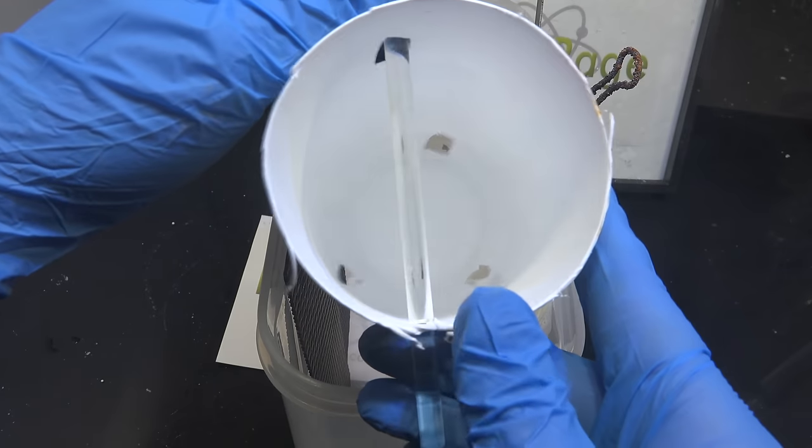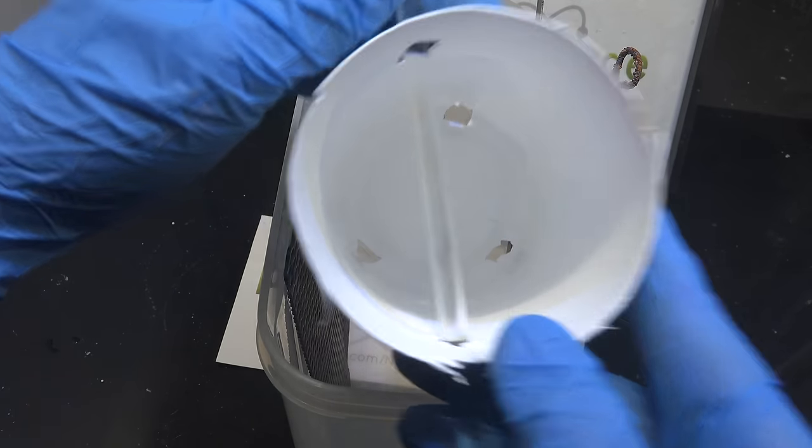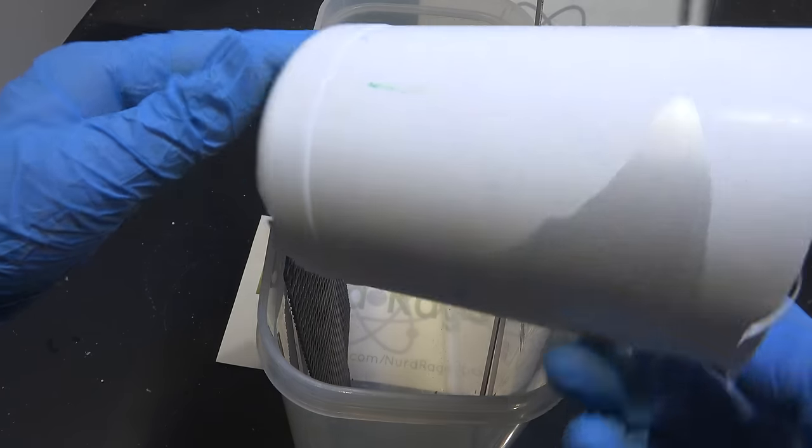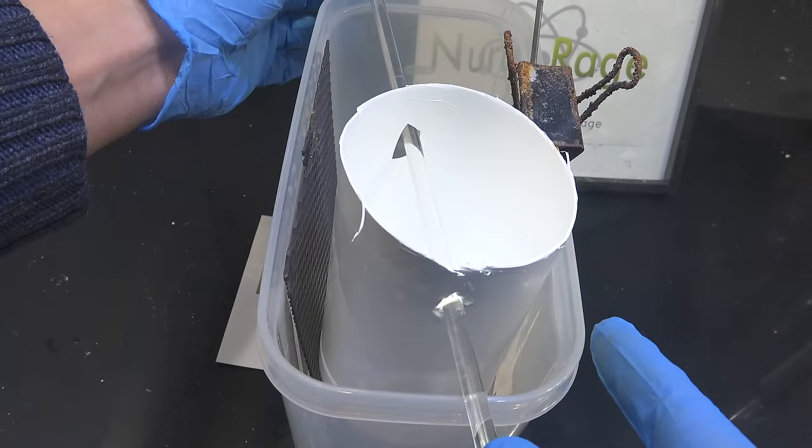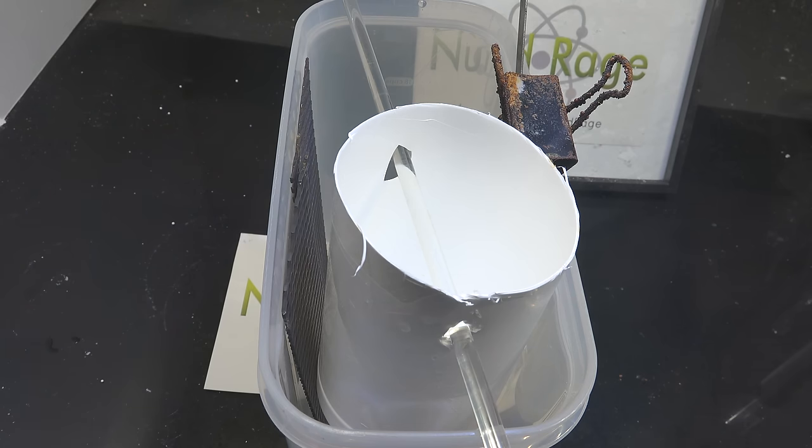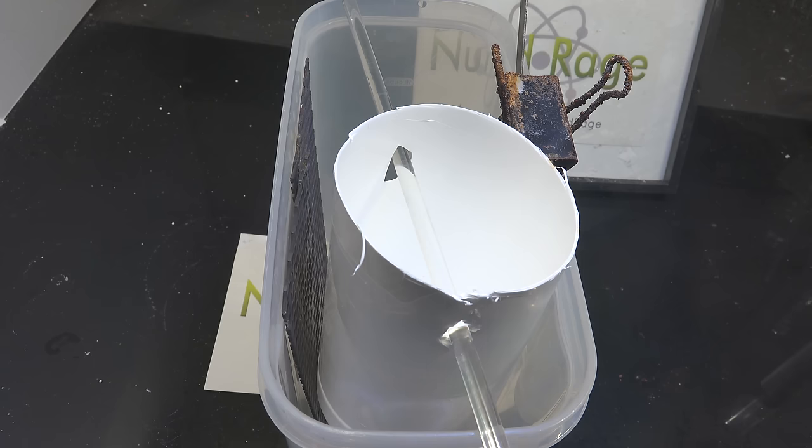Now something optional you can add is a salt cup. It's nothing more than a plastic cup with a few holes poked in the bottom. The glass rod I've skewered through it lets me suspend the cup near the top of the cell but the bottom will be below the water line. The idea of the cup is that you can add salt to it and have it slowly dissolve the electrolyte.